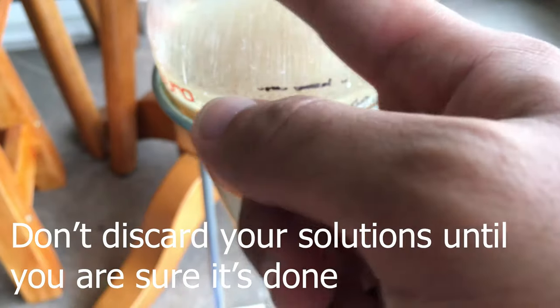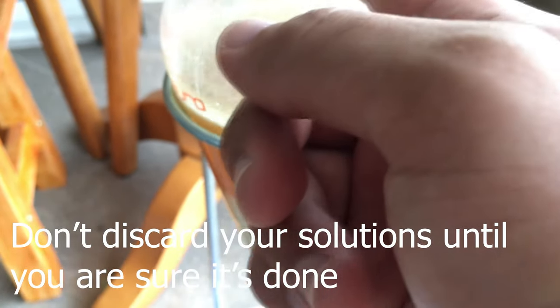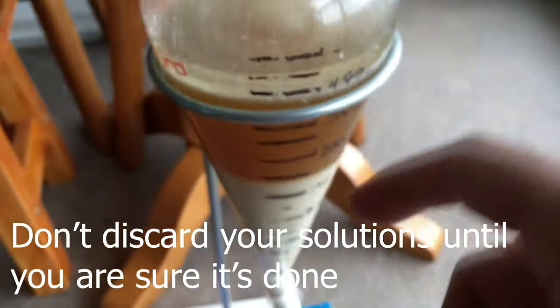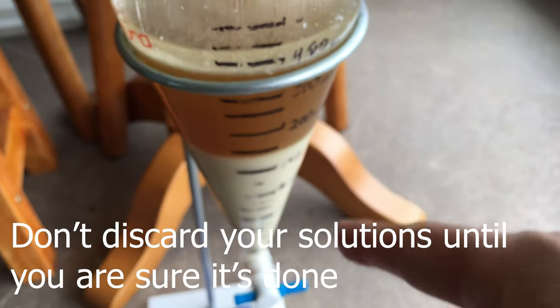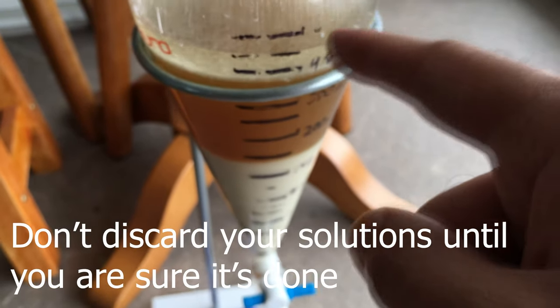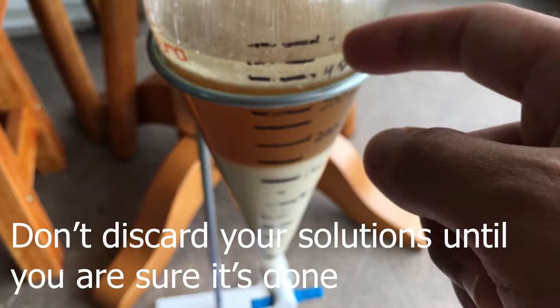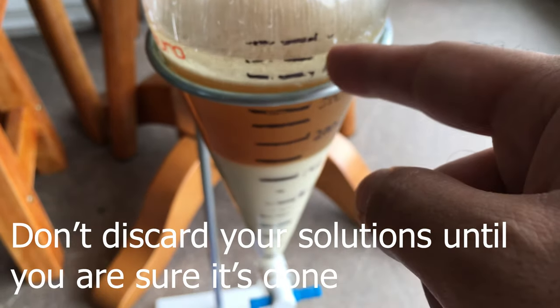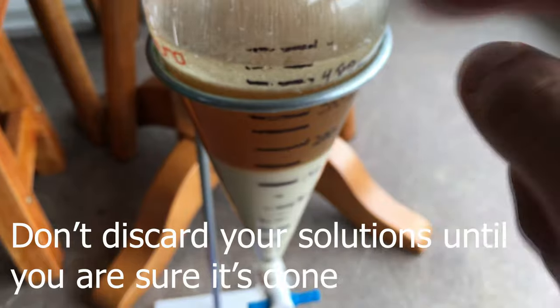Instead of starting with dry material, you start with a reduced tea. Then you basify it, you pull, you salt to reduce the water content in the ethyl acetate, and then you salt directly without any rest.